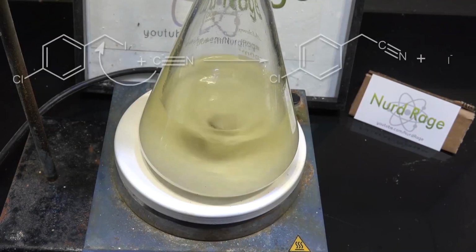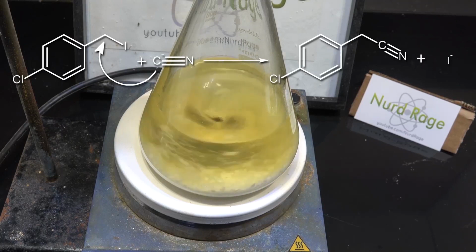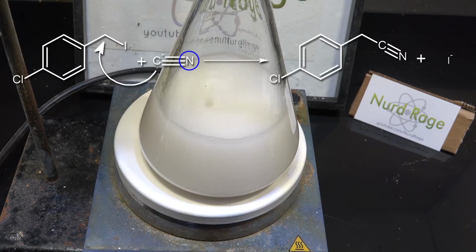It's actually a side product of our reaction. We made P-Chlorophenyl by nucleophilic substitution of cyanide onto a benzylic halide. But cyanide is nucleophilic on both ends. Both the carbon and the nitrogen are nucleophilic, and either side can attack the substrate. Now the carbon side is more reactive in water-free conditions, which is why we used acetone with the water removed. But attack by nitrogen is not eliminated.